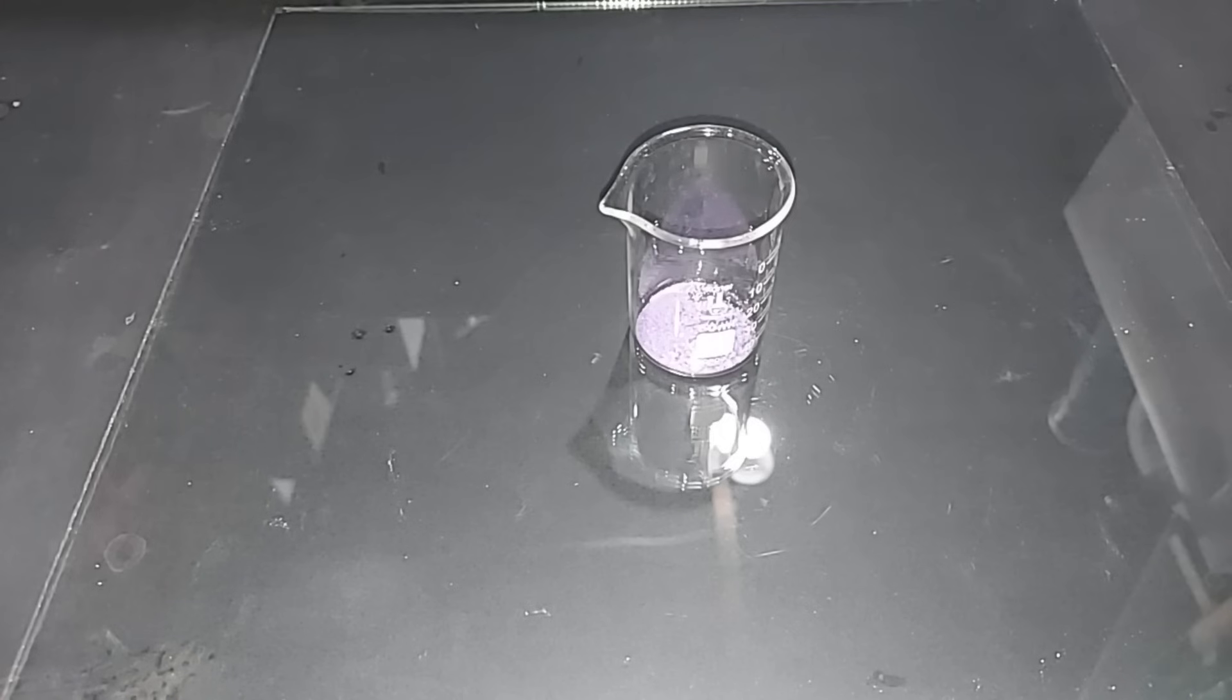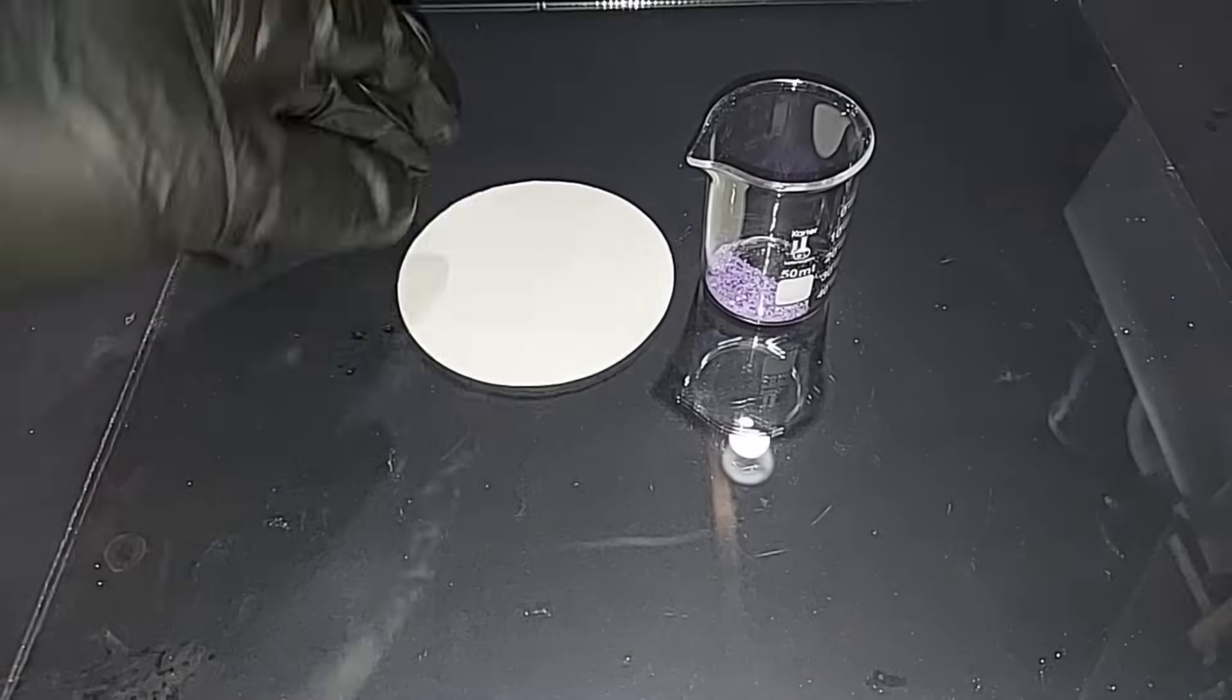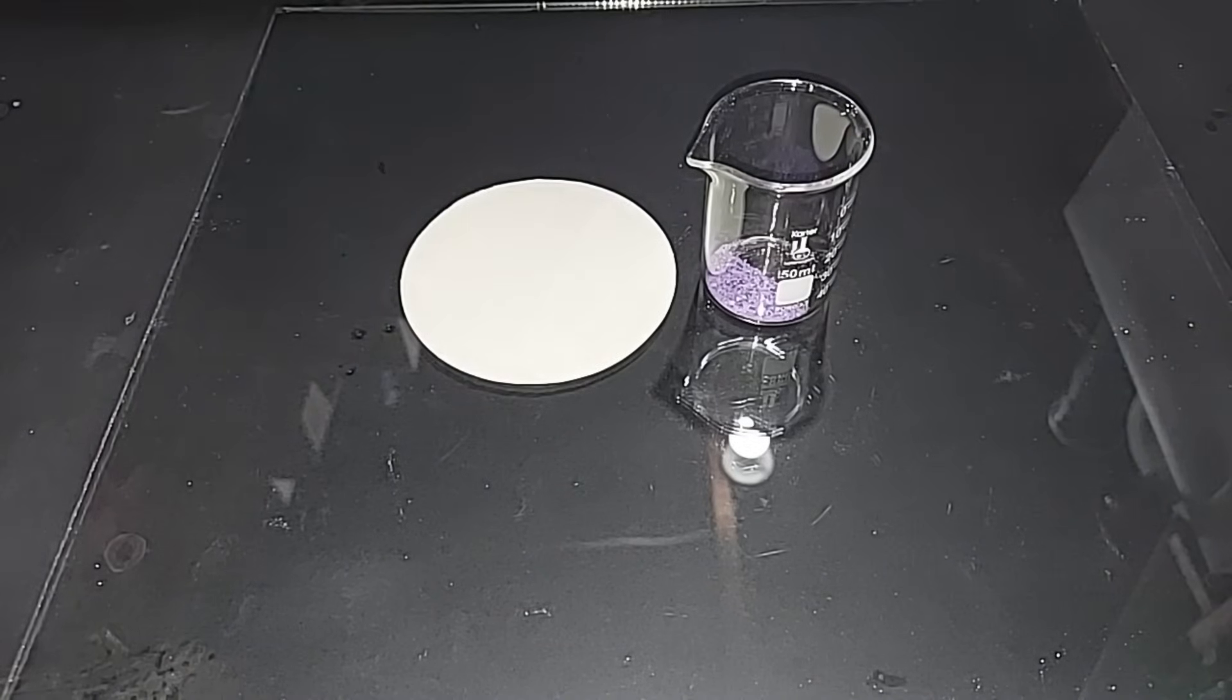So I'm going to test the NHN by putting it on a little bit onto this filter paper here. I'm going to take a fuse next to it and we'll light it so I can get far away before it goes off. The blob that I placed in the middle of the one last night did not turn out very good—it was really humid and rainy all night and it sort of spread out and soaked into all of the filter paper and it didn't really accumulate in one spot where I could light it. So unfortunately that's not going to work, but I'm going to get this set up right here and we'll go out and test it. It's all set up. That is about two tenths of a gram—I weighed it. So let's light it.